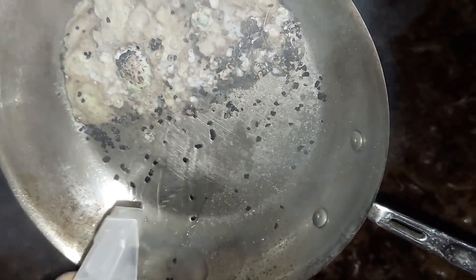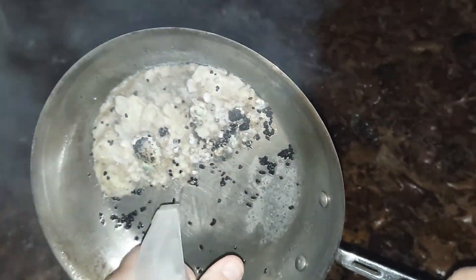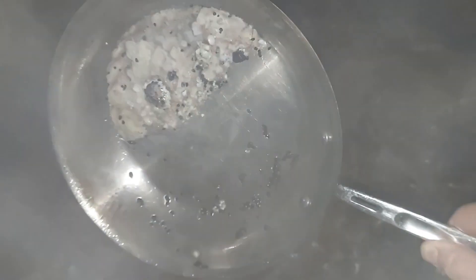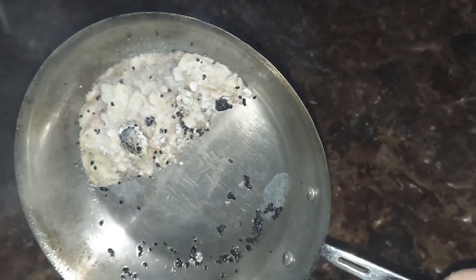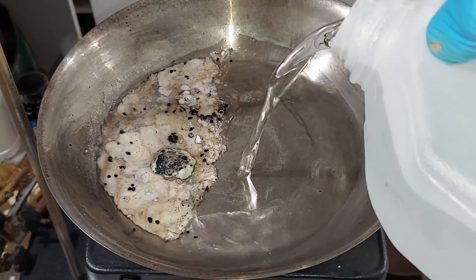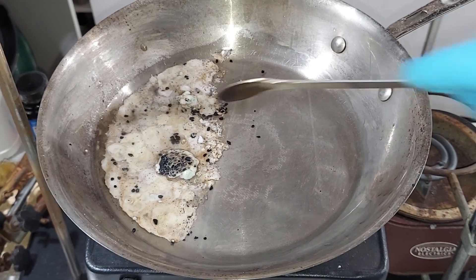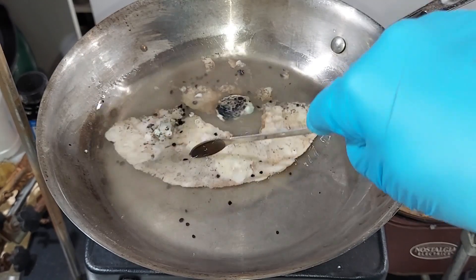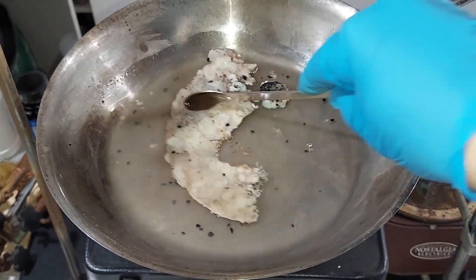I'm going to lose some sodium nitrite, but I'd rather do that and have a purer product. We have a clear demarcation — from the bottom down I'll get rid of all of that with paper toweling, but from halfway up I'm pretty sure that's going to be all sodium nitrite. It's very soluble in water, sodium nitrite, so that should be enough. It already loosened from the pan very easily. I don't want too much water because that means later we have to evaporate a lot more, but we'll see how this goes.